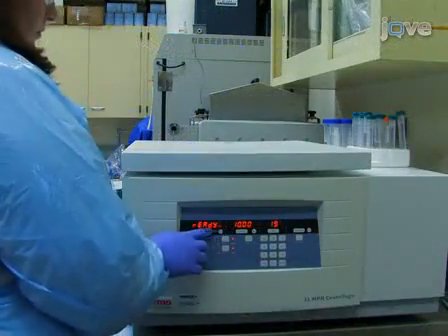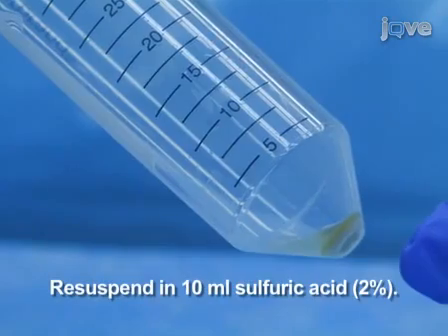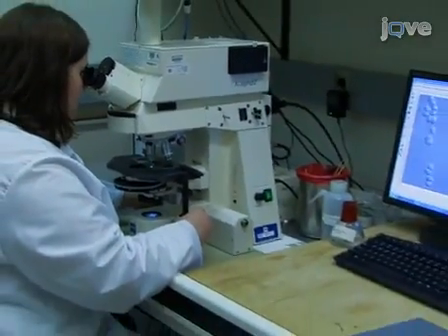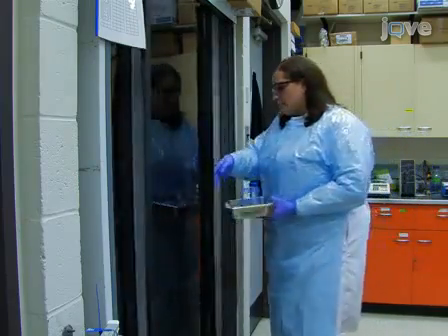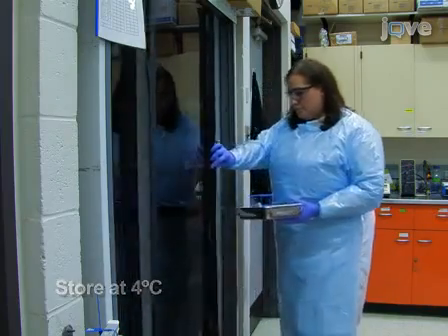Once the final washes have finished, carefully aspirate the supernatant and resuspend the pellet in 10 ml of 2% sulfuric acid. Check the oocysts under the microscope to ensure that all fecal debris has been successfully removed from the sample. The oocysts are now ready for further manipulation, or you can store them at 4 degrees Celsius until you're ready to use them.